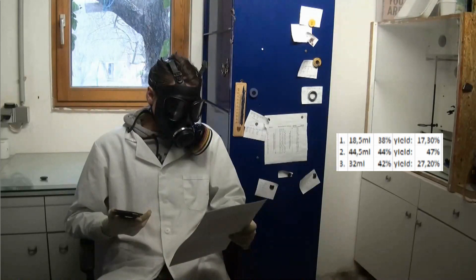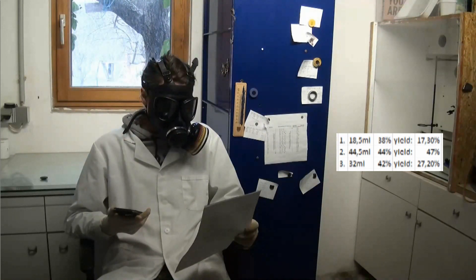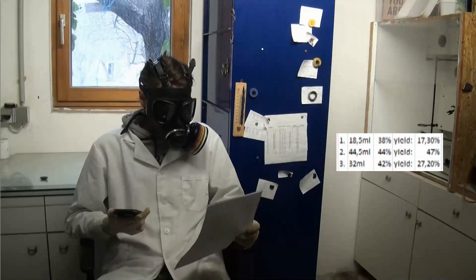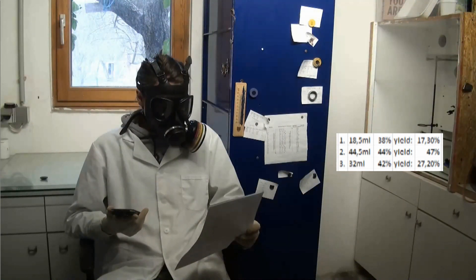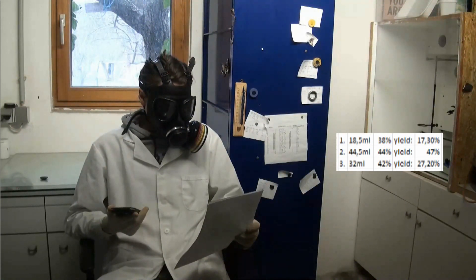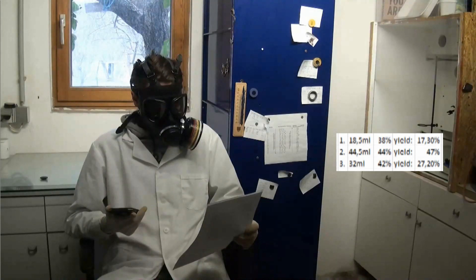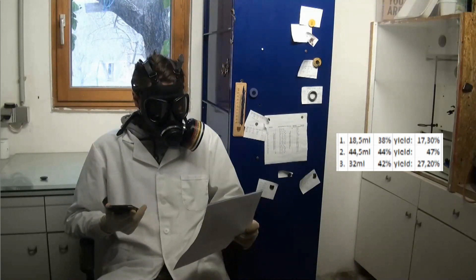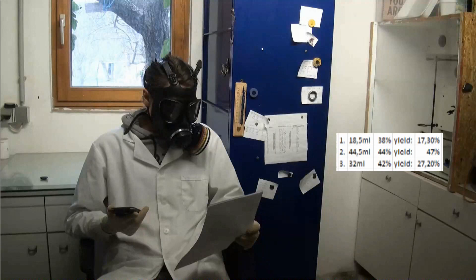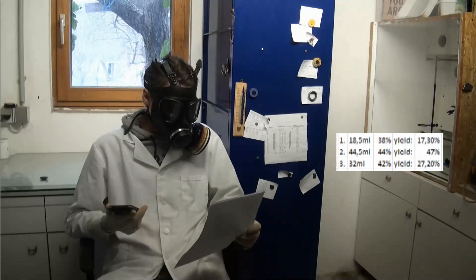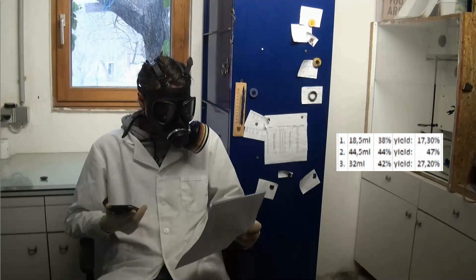I also did a third distillation using 1 mole of potassium nitrate and 0.7 moles of phosphoric acid, which gave me 32 milliliters of 42% nitric acid, which corresponds to a yield of 27.2%.